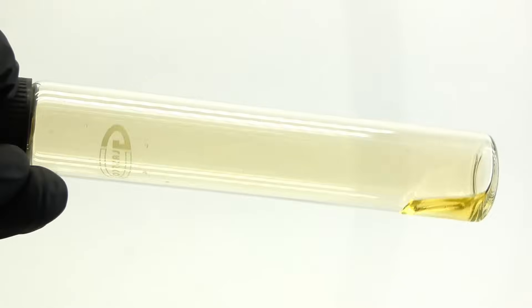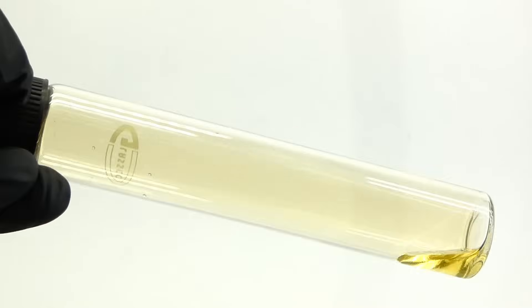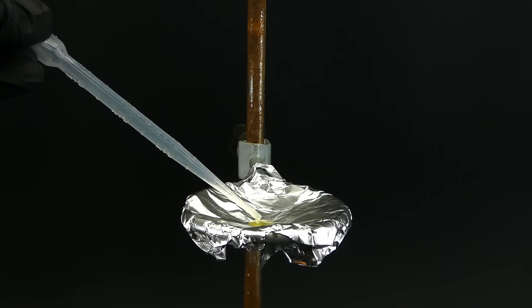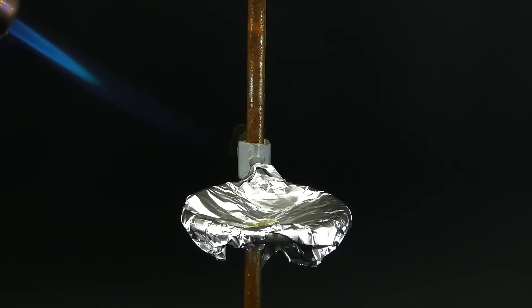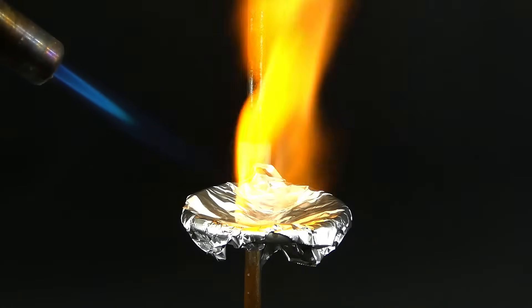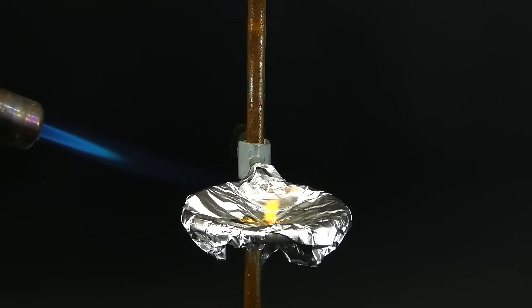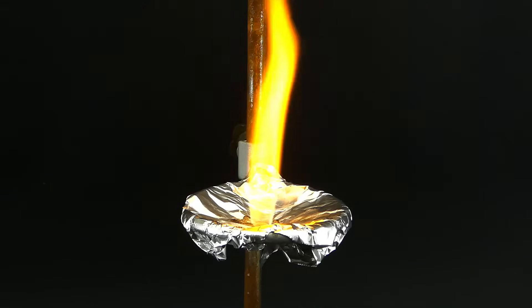As the first experiment, I wanted to test out its flammability, because contrary to what you might think, nitroglycerin doesn't explode upon being ignited. It is even quite hard to get going, and burns really quickly with a bright flame. This is actually a good way of safely disposing of it, and after I am done experimenting with it, I am going to dispose of what I have left this way.